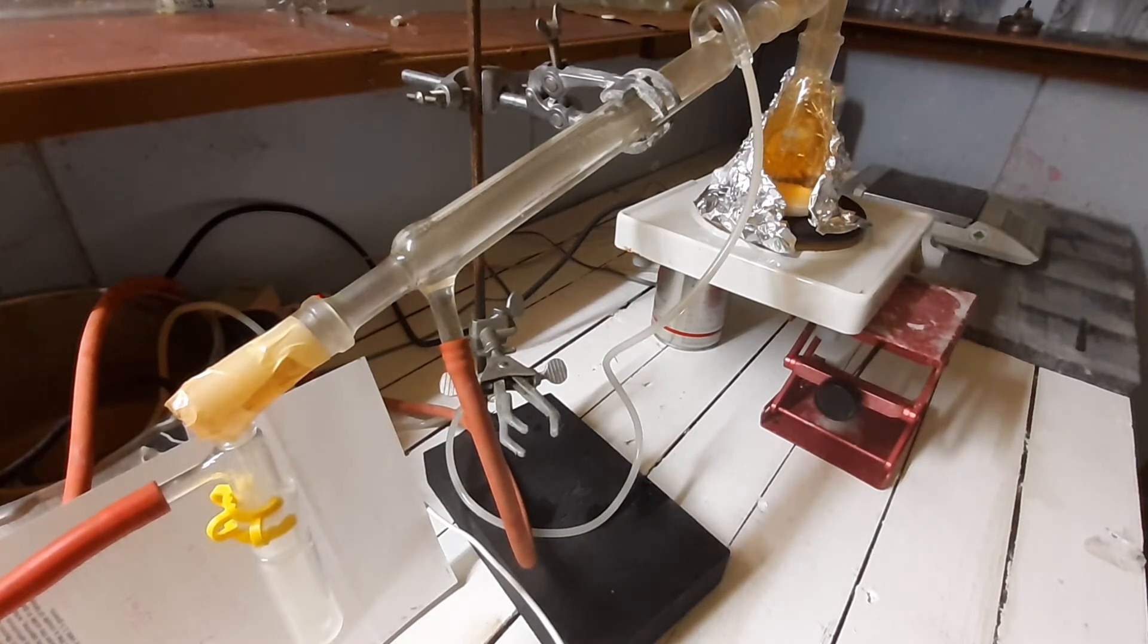Also, I greased the joints with some sulfuric acid. I do have vacuum grease, but the nitric acid tends to just destroy it.